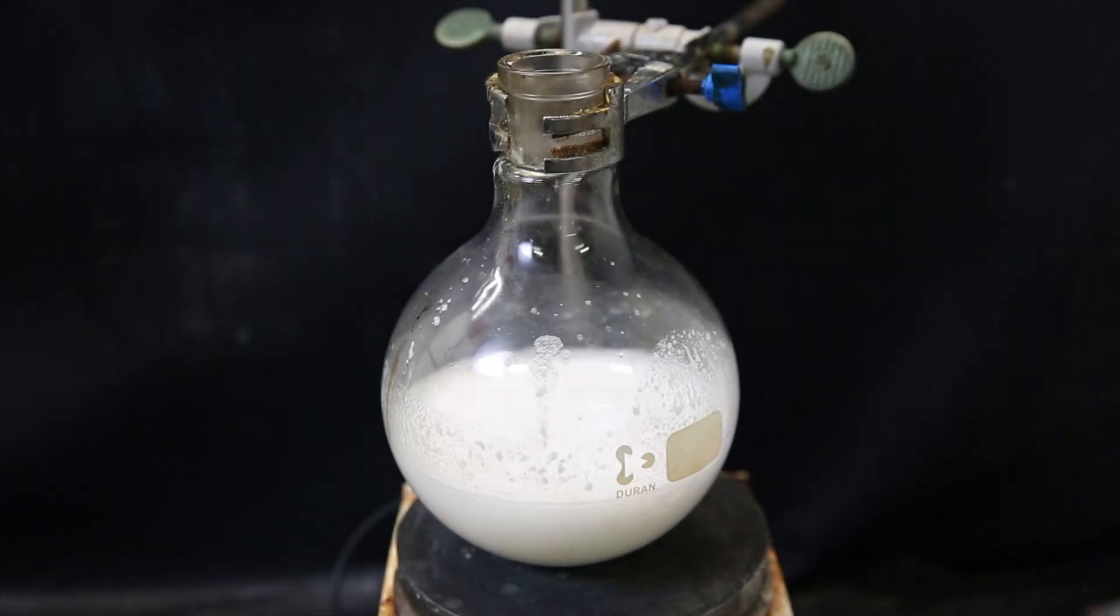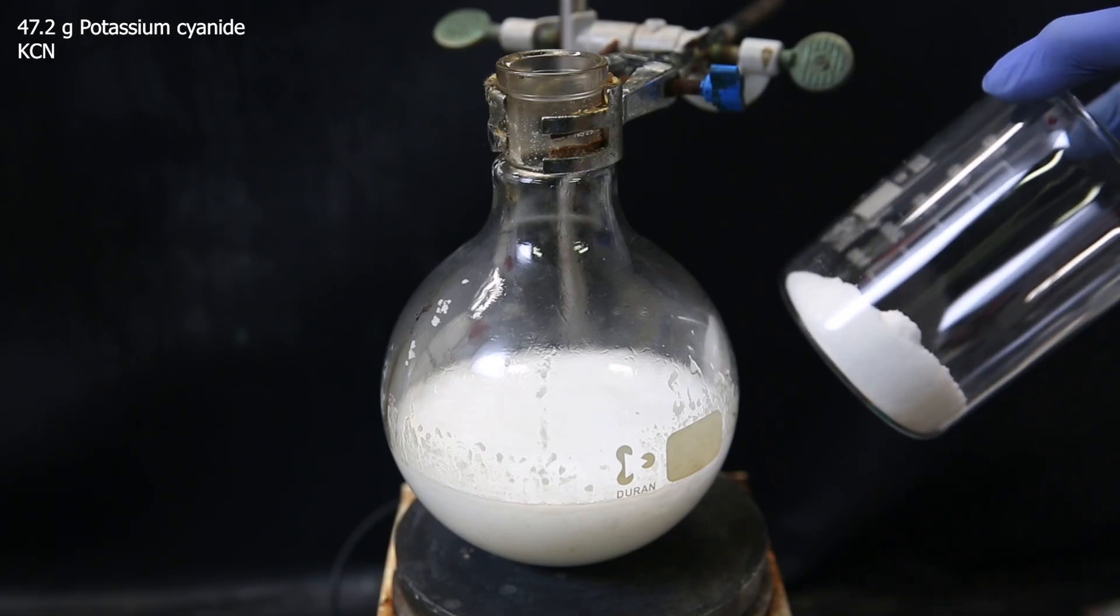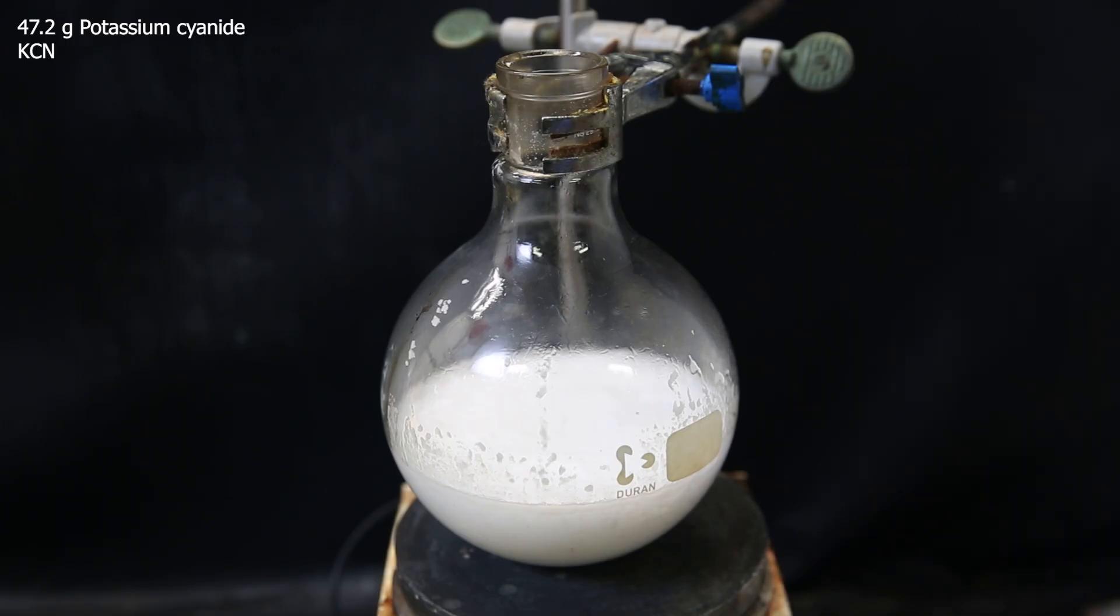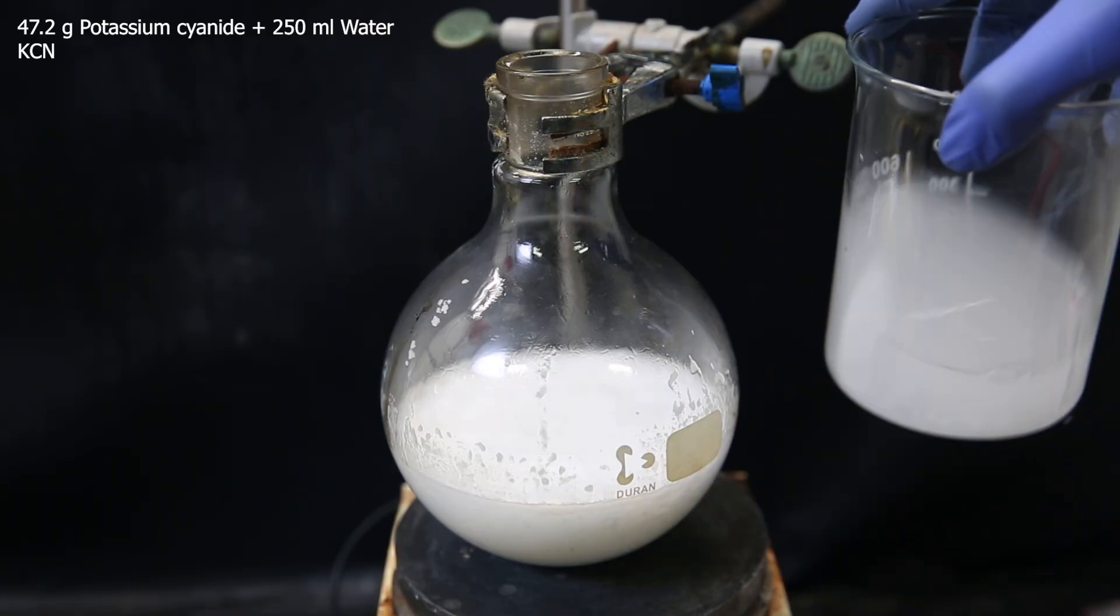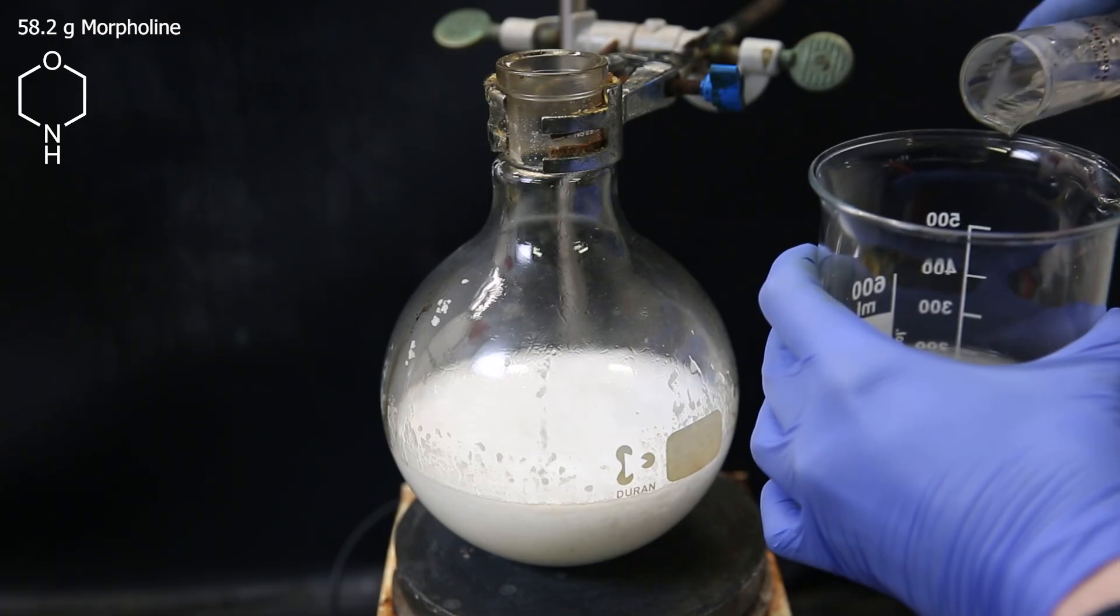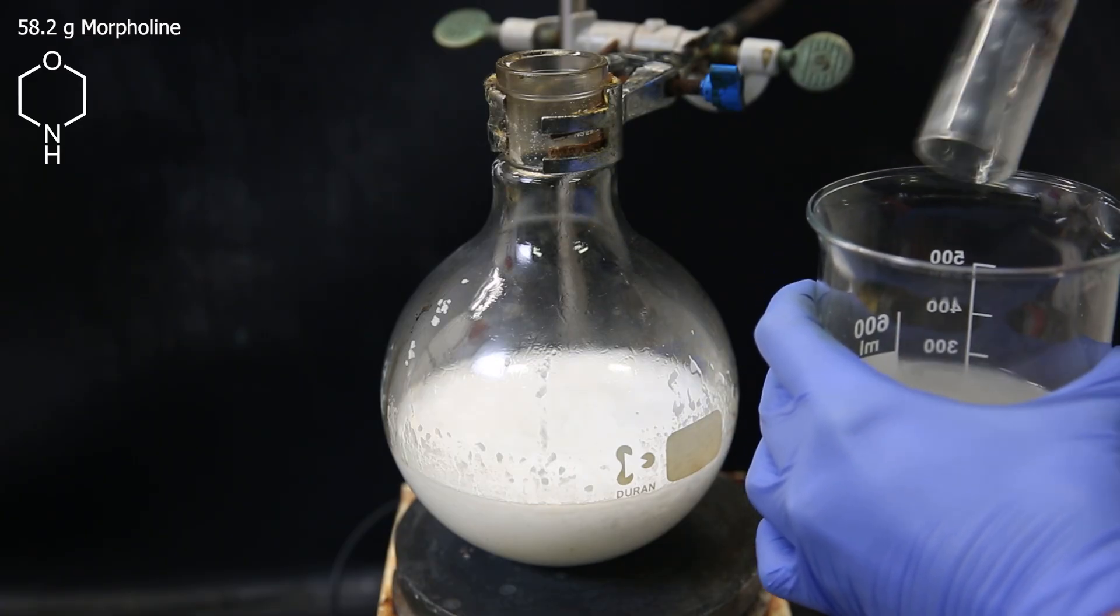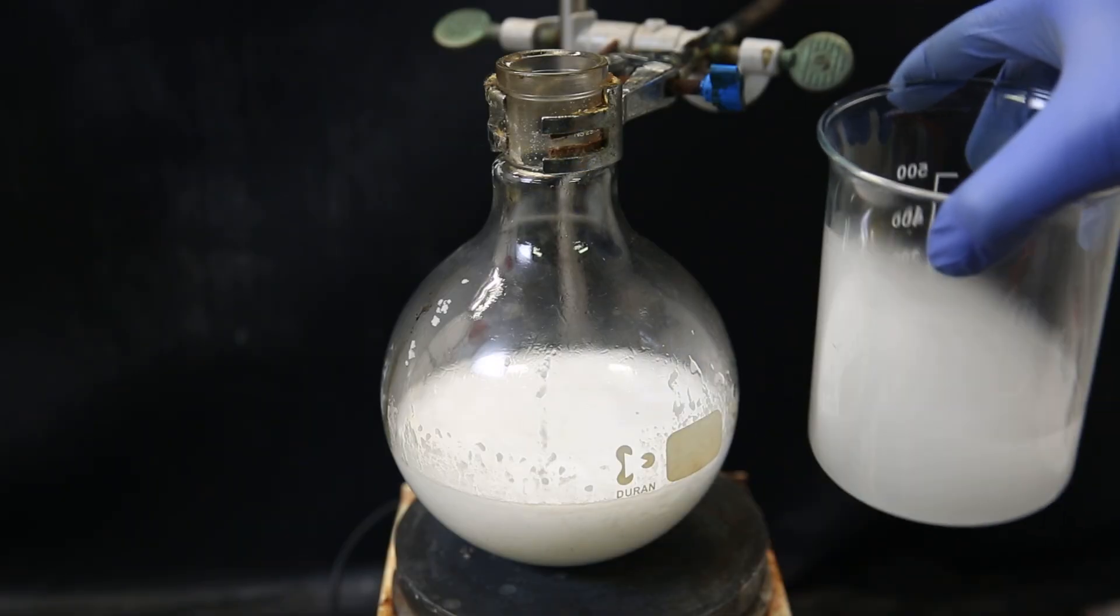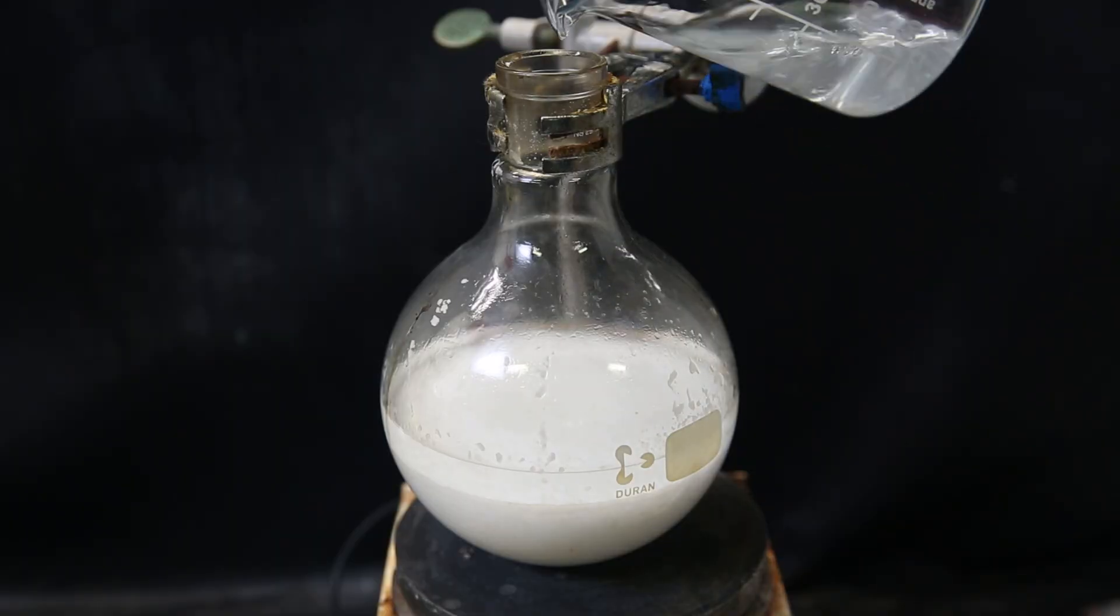After letting it stand for 15 minutes, I assume it all reacted, and I can use it directly for the next step. So first, in this beaker, I weigh out 47.2 grams of the salt potassium cyanide, which I dissolve in 250 ml of water. I then weigh out 58.2 grams of the reagent morpholine, and mix that into the potassium cyanide solution. When it has pretty much all dissolved, I add the full mixture to the cyclohexanone bisulfite complex.